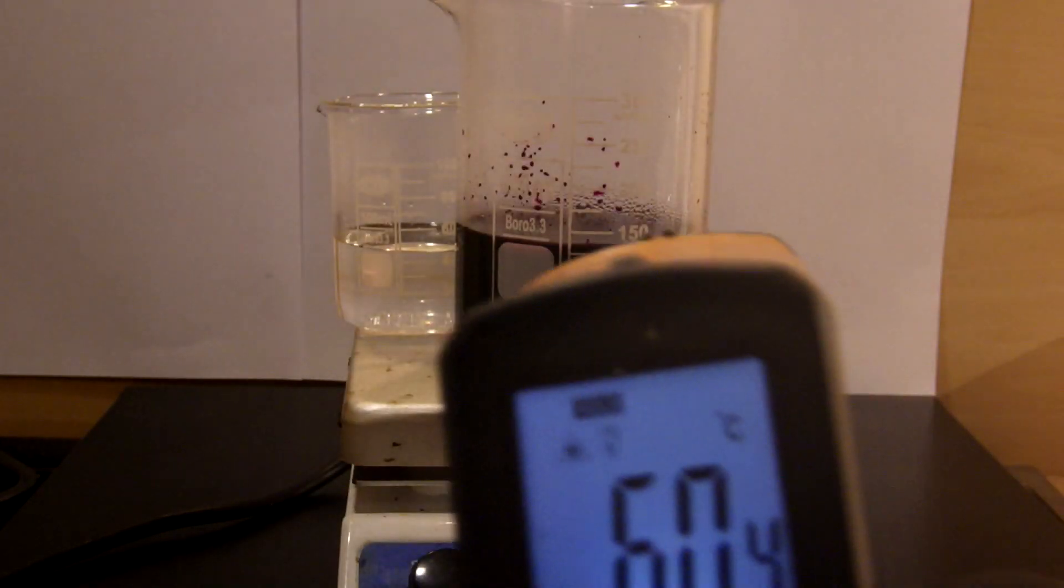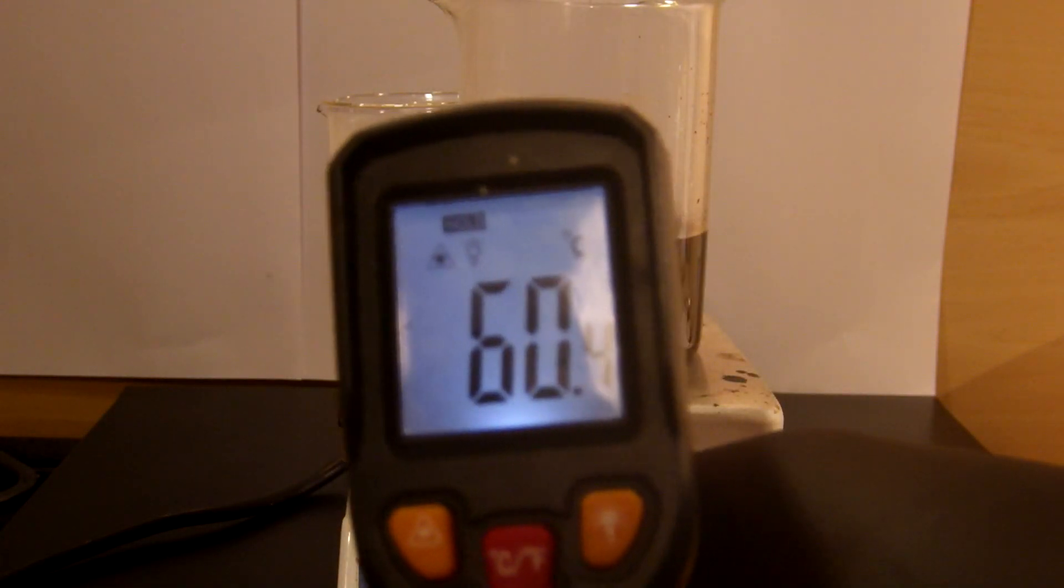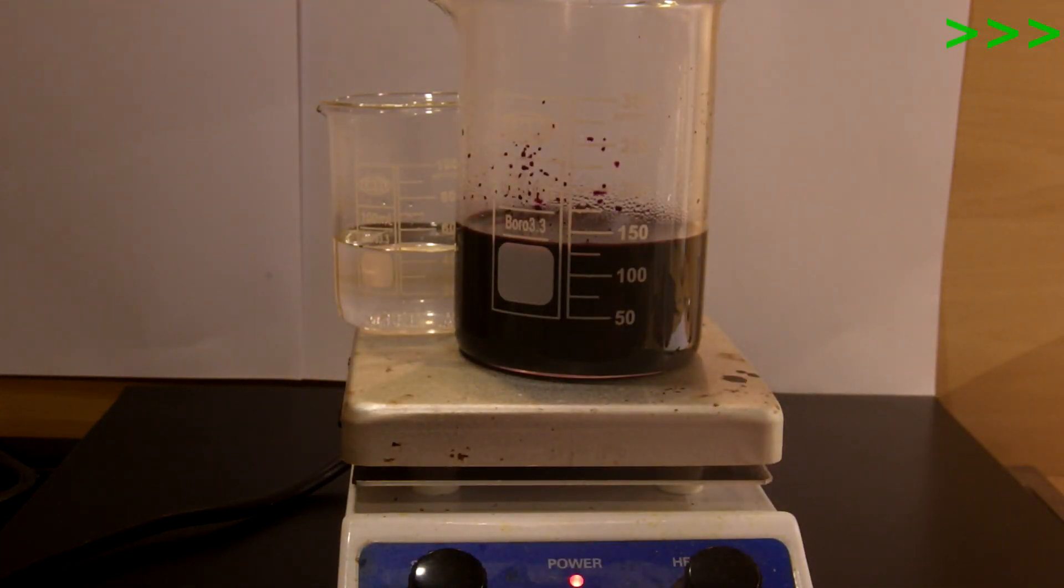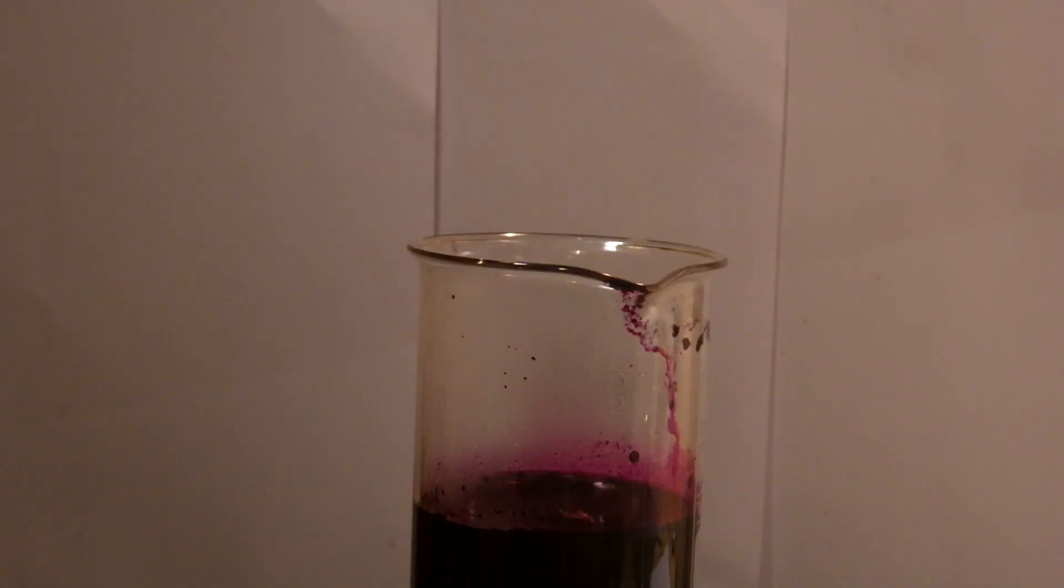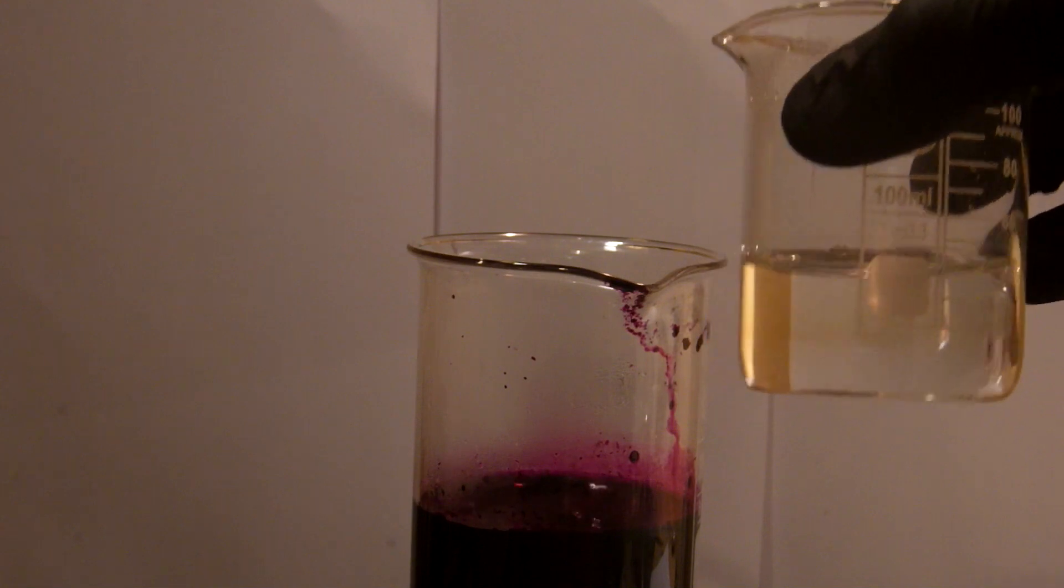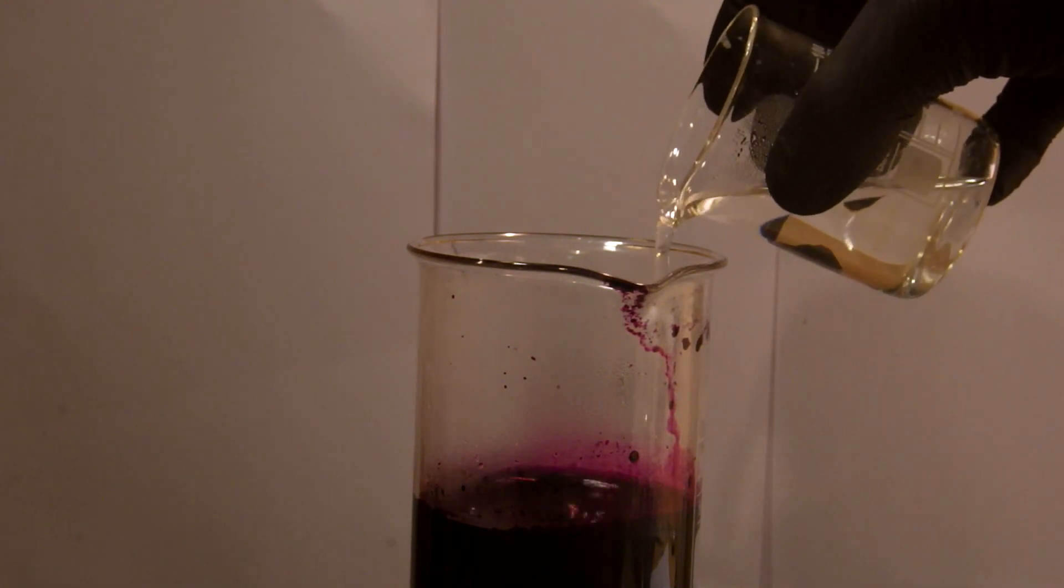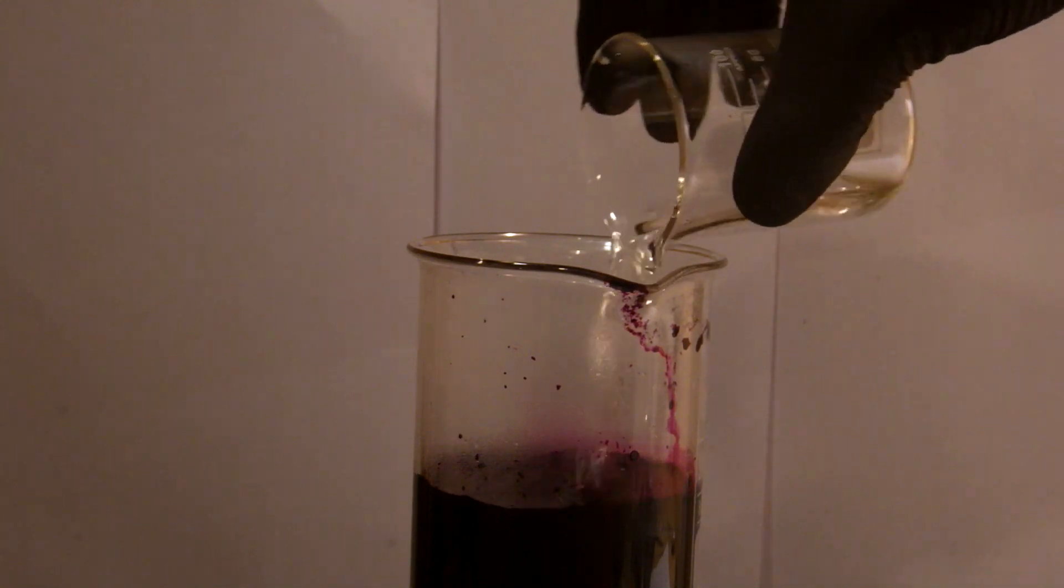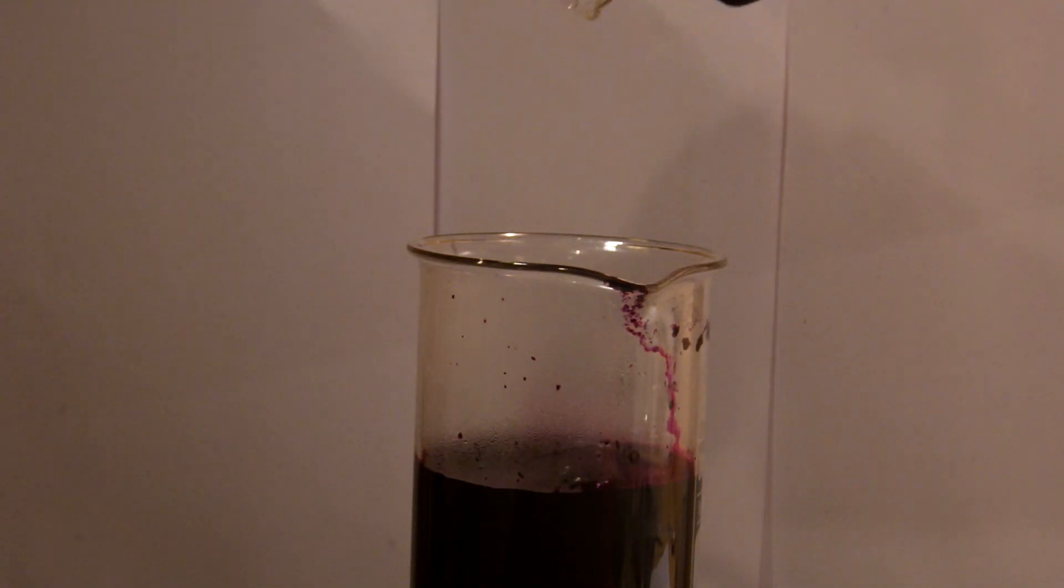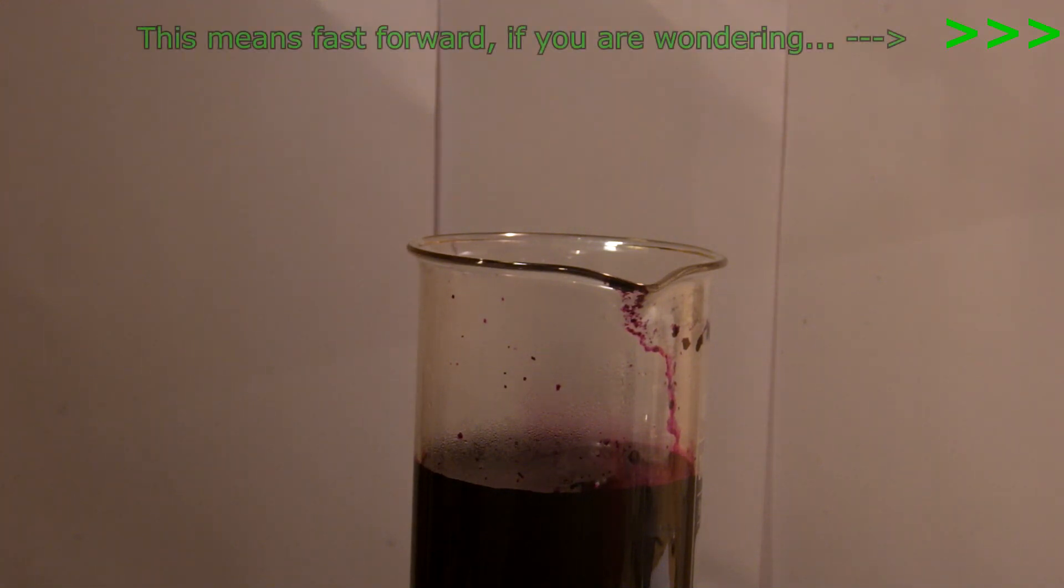Keeping temperature at about 60 Celsius. Let it stir for a minute.